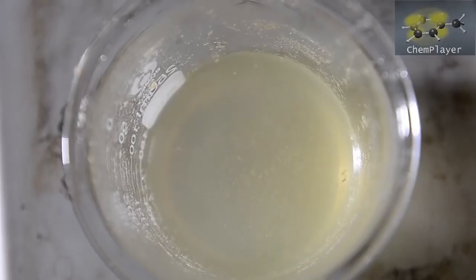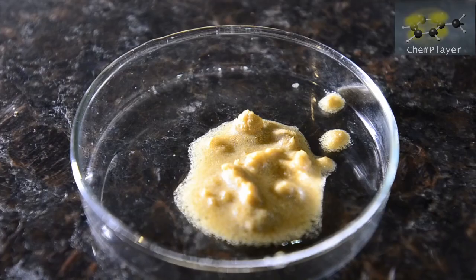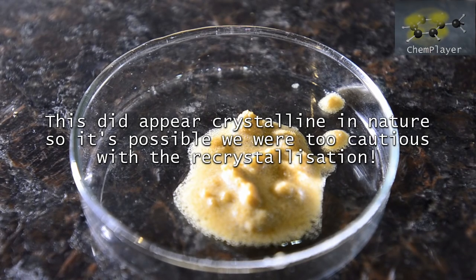We removed any remaining brown fluff from the surface so the mixture was nice and clean. We're not too sure what this is. Perhaps it's simply excess potassium benzilate and we were overcautious with the recrystallization, or perhaps it's a byproduct. We'll have to do some more research to find out exactly.